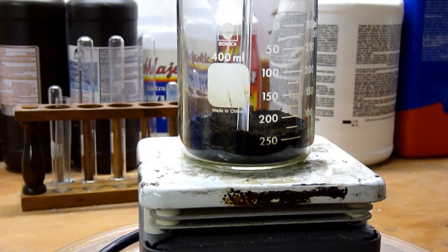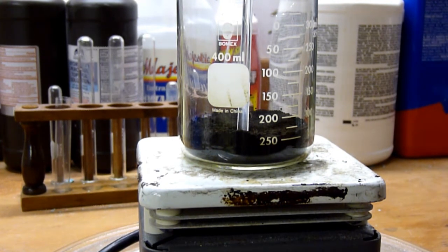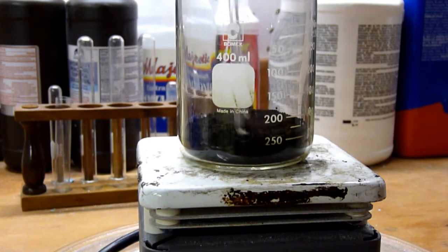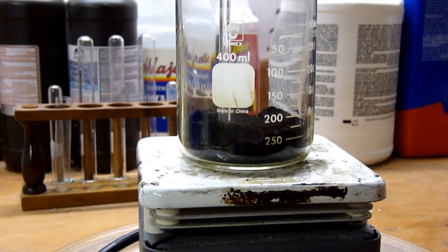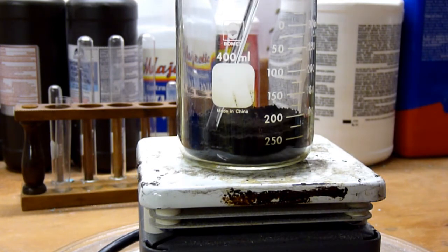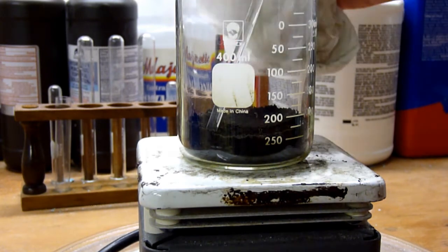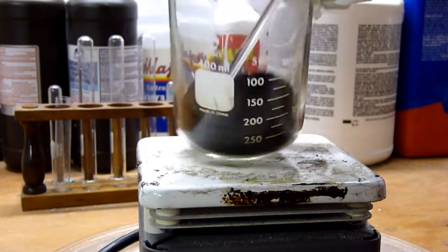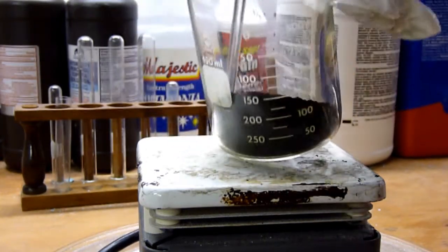After probably about a half an hour of heating we have now converted just about all of our copper carbonate into copper oxide. So you can see it's a very black brown powder. And of course this beaker is very hot so we need something to grab onto it with. And as you can see it's a brownish powder.